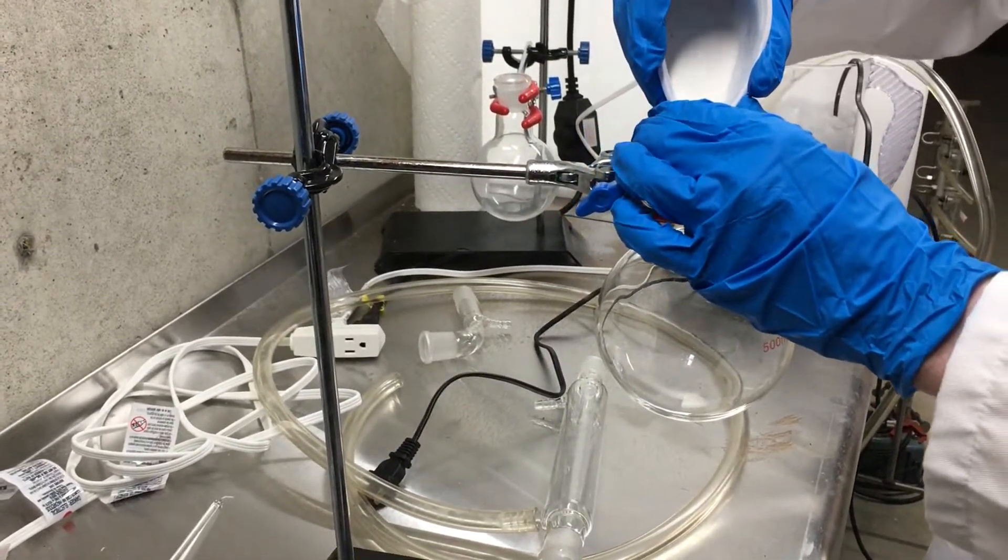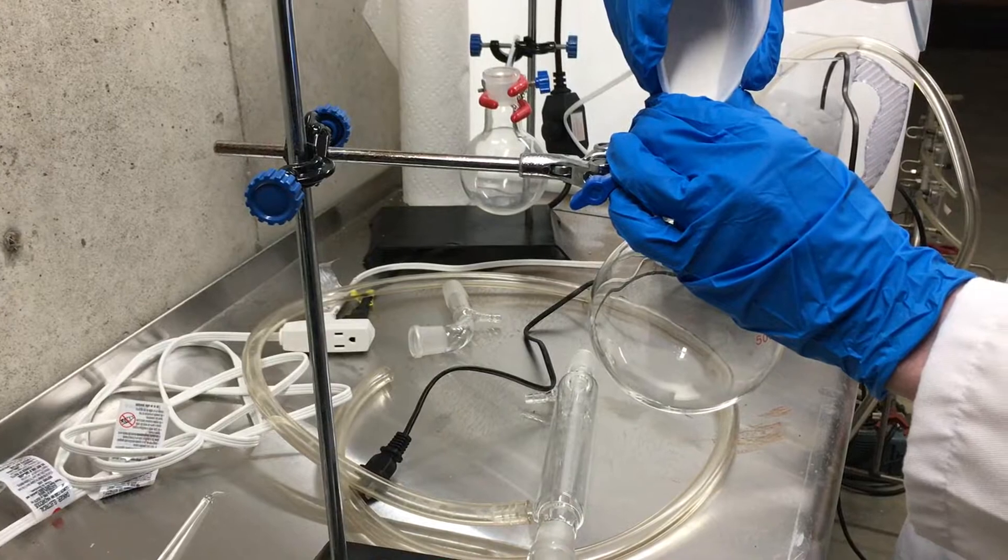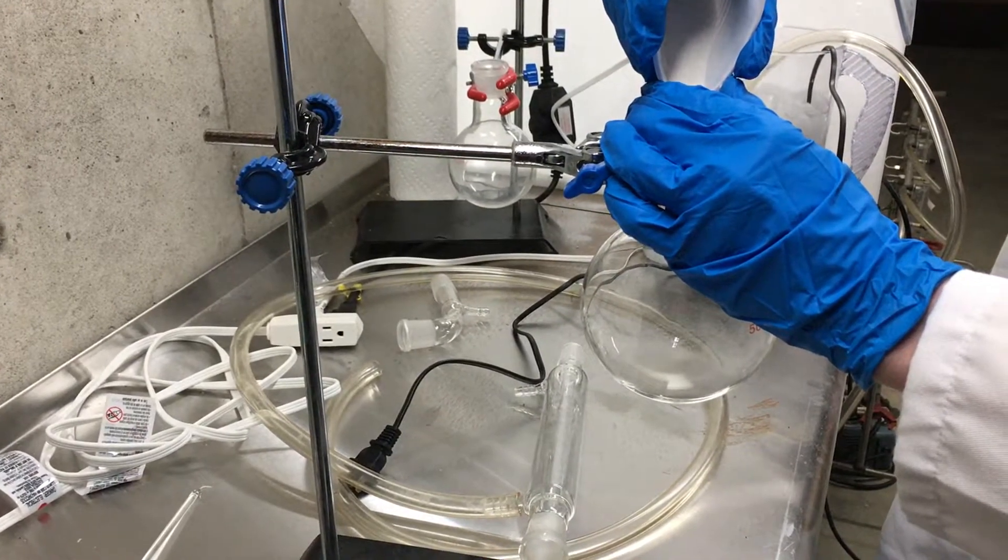Once the potassium nitrate is finally ground up, I add it into a 500 milliliter round bottom flask.